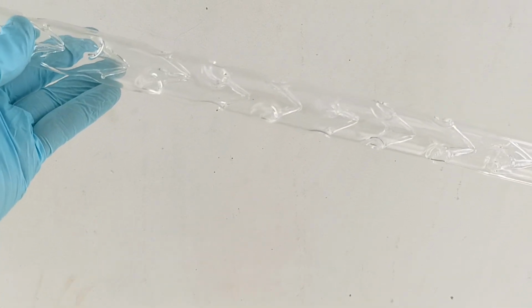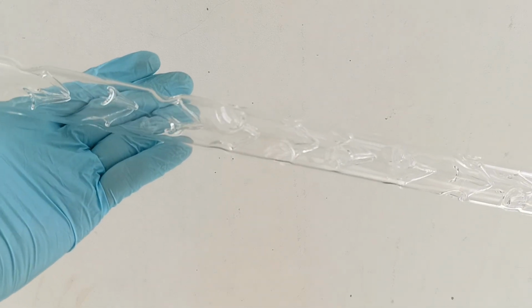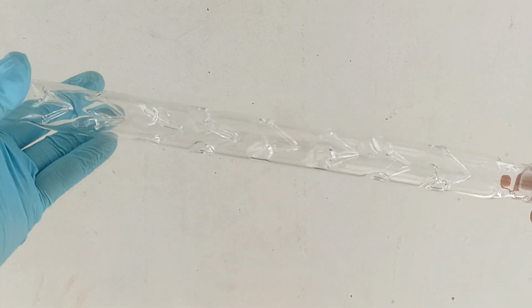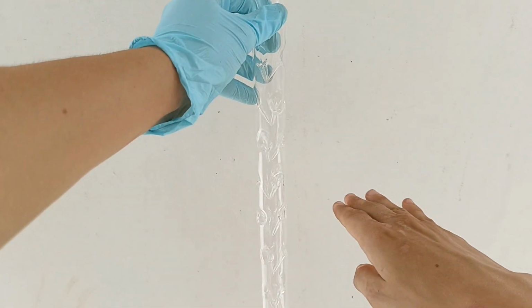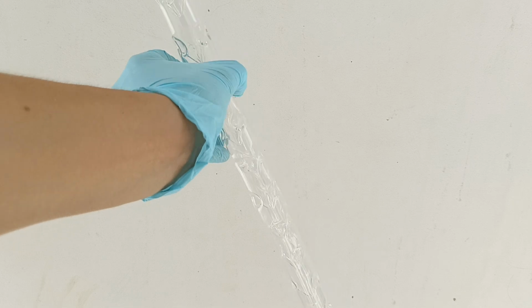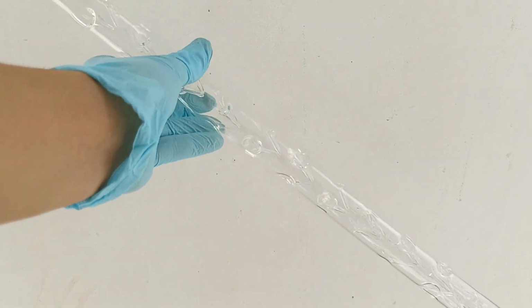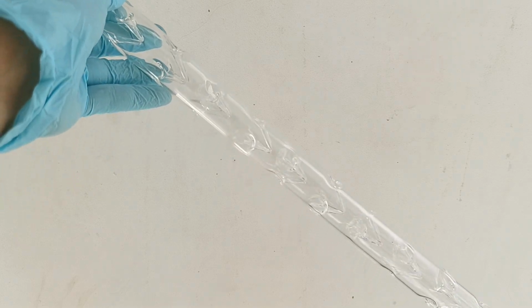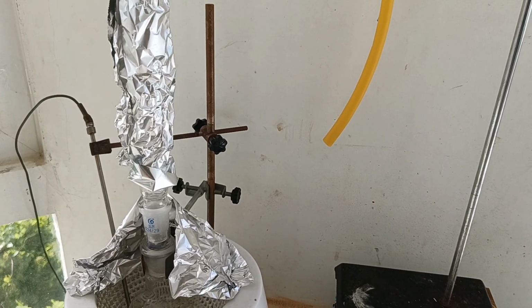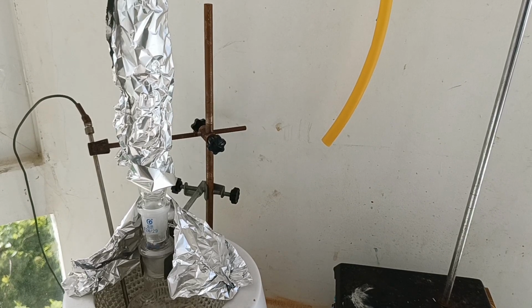As you can see, there are a bunch of spikes of glass inside it. These give a large surface area inside the column, allowing for a good separation of liquids with similar boiling points. It's able to do this because the column has a large temperature gradient from the bottom to the top. So the mixture of liquids refluxes many times in cycles by evaporating, condensing, evaporating, and recondensing, and the cycle repeats, and this helps with good separation of the liquids. Anyways, I insulated the column with some aluminum foil to help keep the heat in.